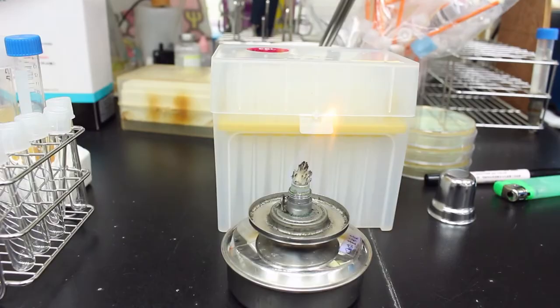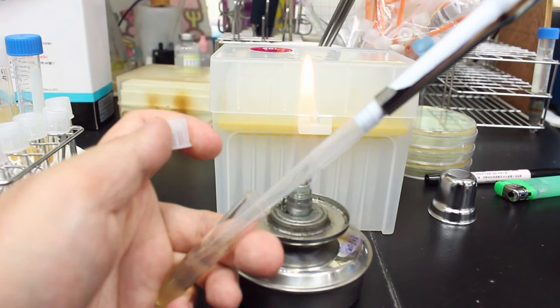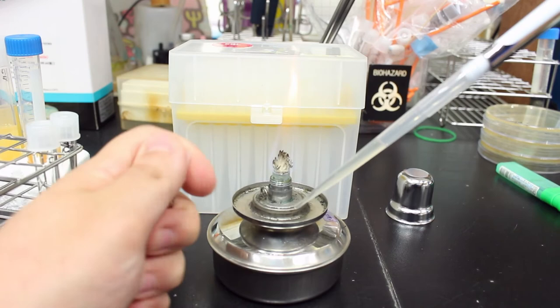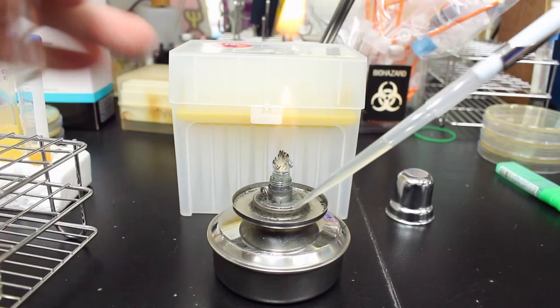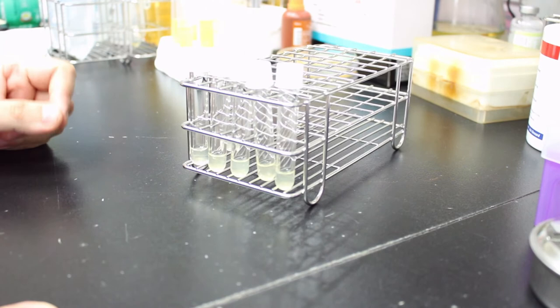First I dilute the plasma with sterilized saline and mix with bacteria that I want to test. Then put it in an incubator along with a plasma only negative control for an hour. After that, check the mixture every half hour and compare with the control to see if precipitates show up. S. aureus has coagulase that will make the plasma coagulate. It can use this method to protect himself from being eaten by immunocytes like neutrophil, aka white blood cell. And this feature can help us distinguish S. aureus from S. epidermidis, which is another common skin bacteria.